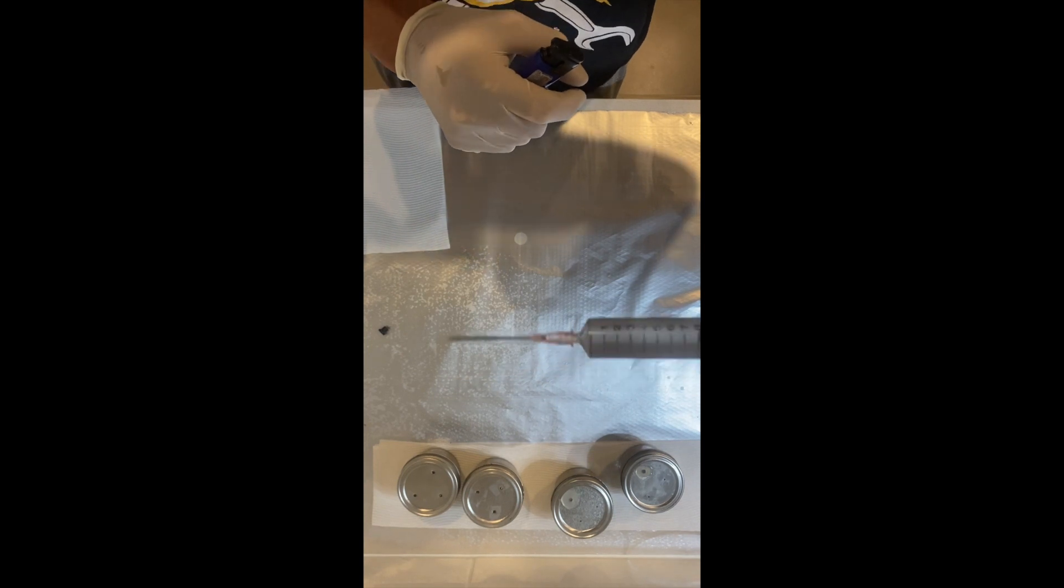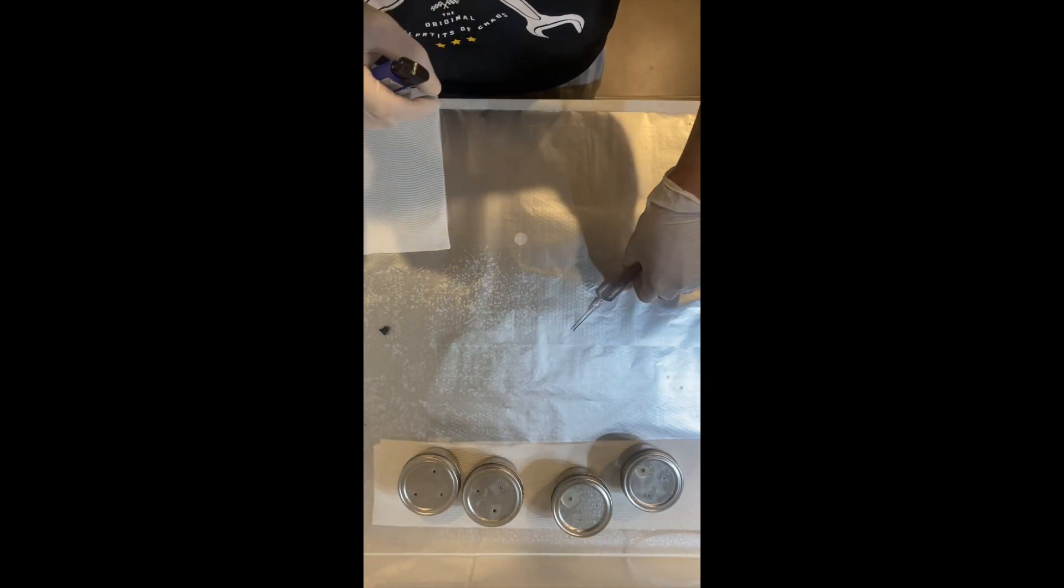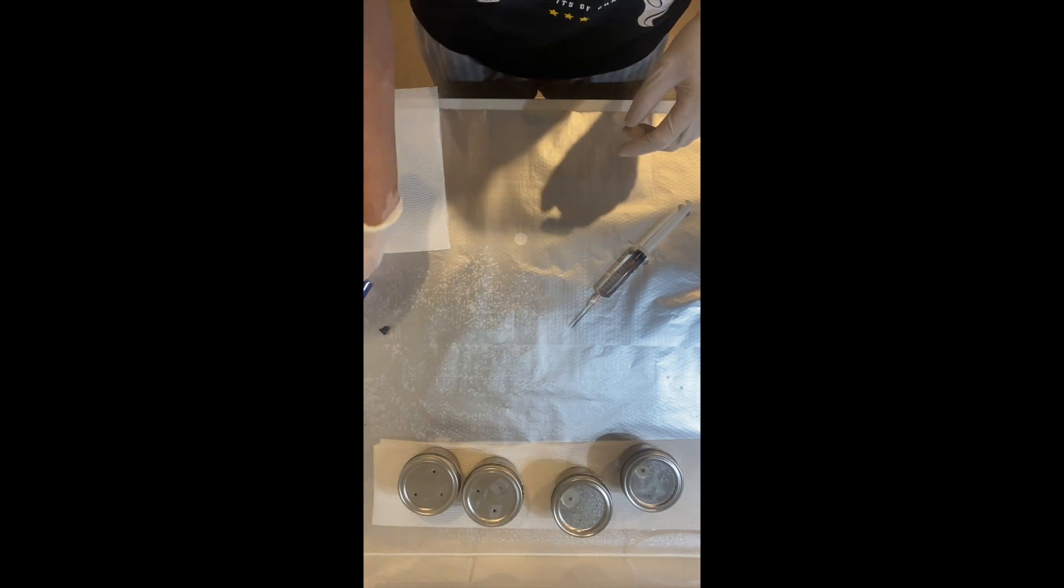Now we could use that hot and just straight away inject it because the first mil will actually cool that needle tip down, but I'm going to just let it sit for a moment. We can put our lighter away now.